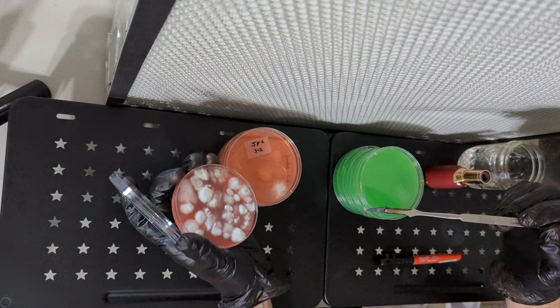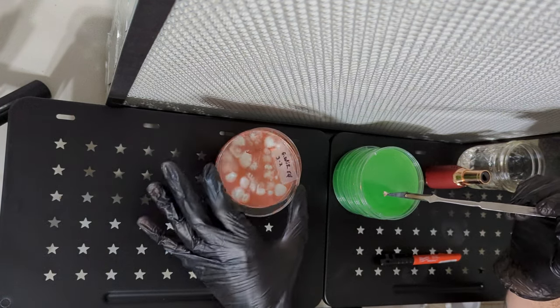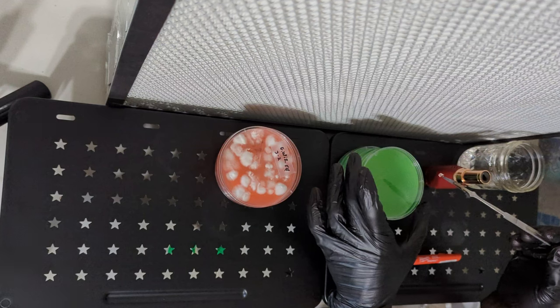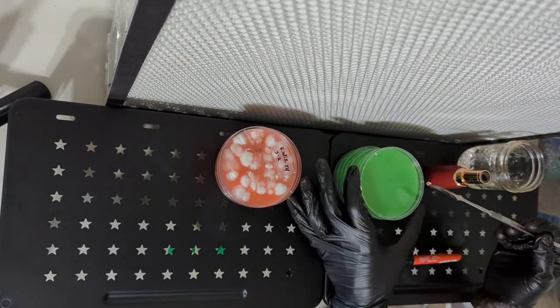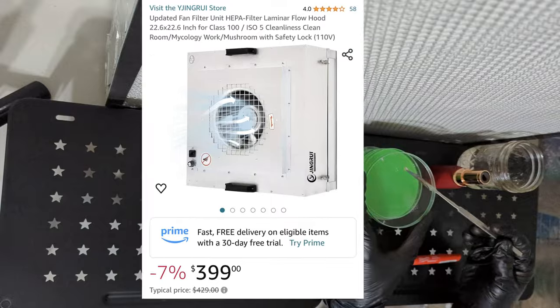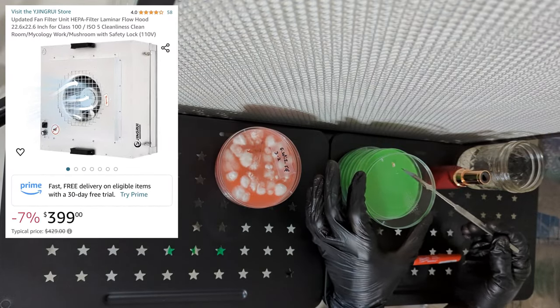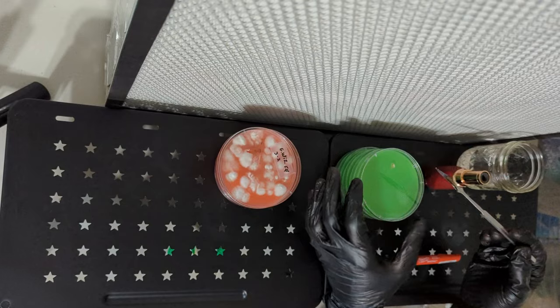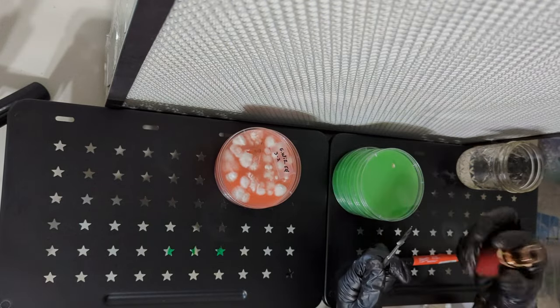If they are well built and taken care of, along with having a pre-filter, FFUs are said to last about 5-10 years depending on usage. I got mine from Amazon for $427. It's a 22x22. It's a little bit small, but it does the job.